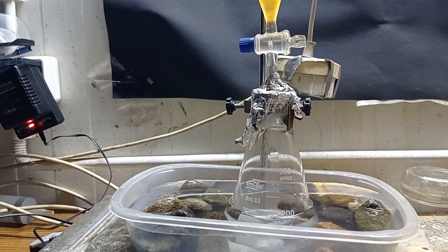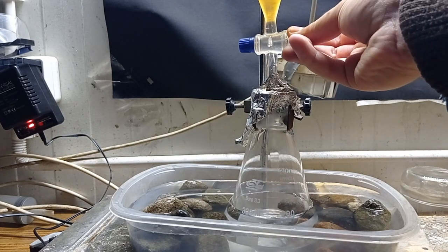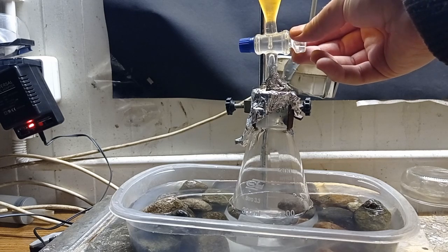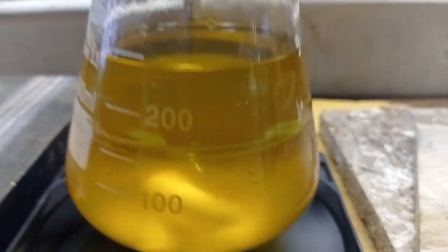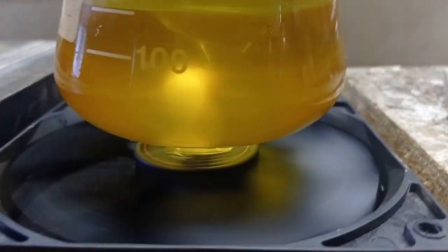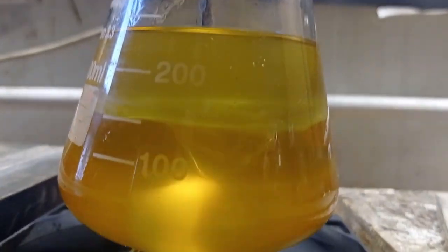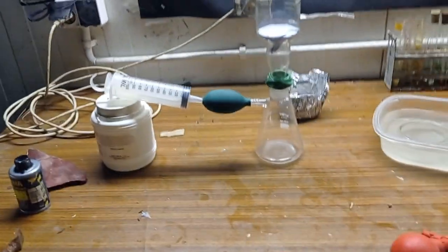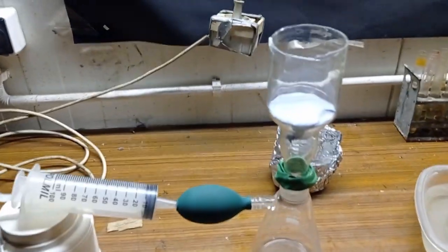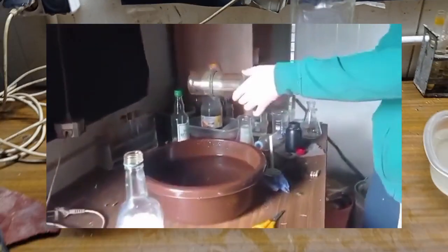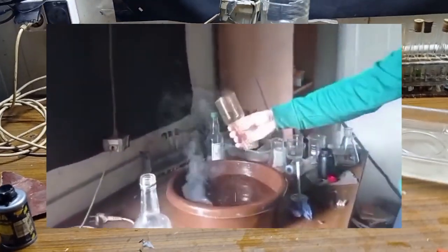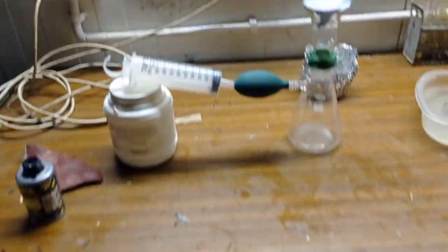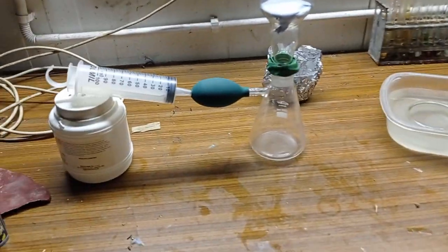So the nitrotoluene mixture is still in the freezer and I prepared myself a DIY almost vacuum filtration setup. And as you see, this is manual because I don't have a vacuum pump.